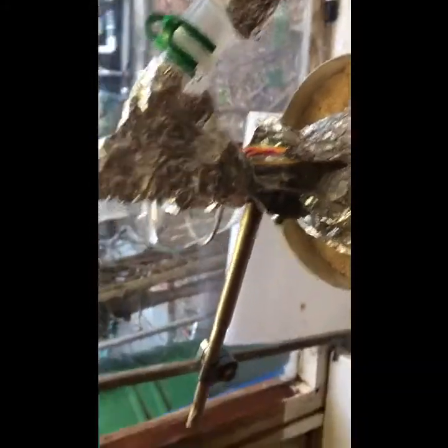There is the setup. After you've added all your sulfuric acid, you want to set up a simple distillation. I'm not using a thermometer because the thermometer adapter's seal seems to not like the fuming nitric acid.